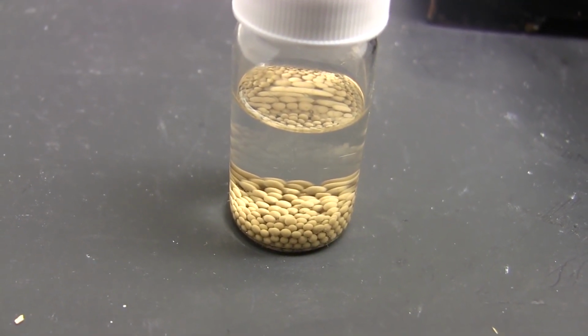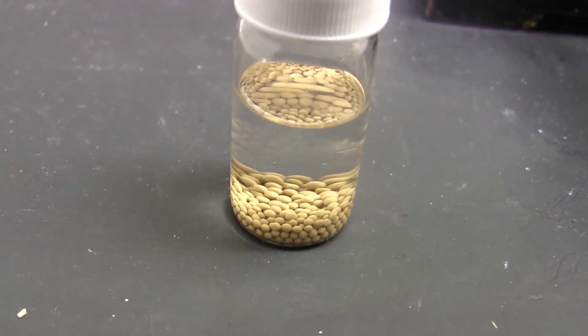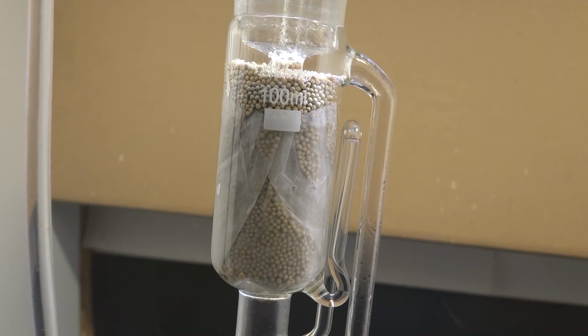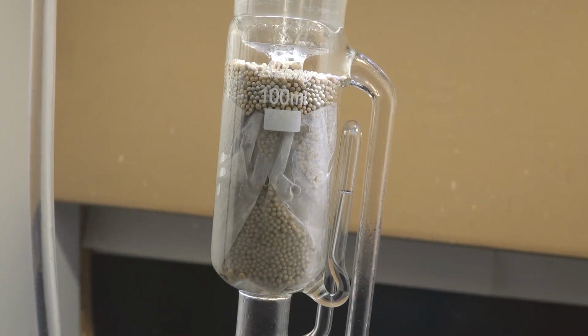Now esters are known for their smells, and this ethyl propionate is no exception. It has a rather sweet, fruity smell. So that is how you use a Soxhlet extractor and molecular sieves to drive forward the Fischer esterification of ethanol and propionic acid.